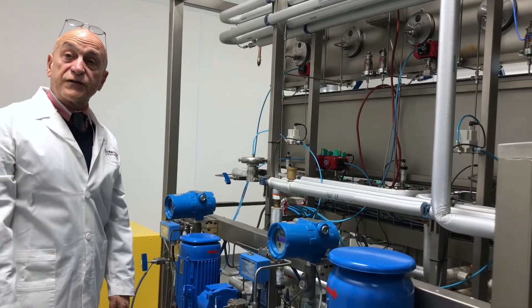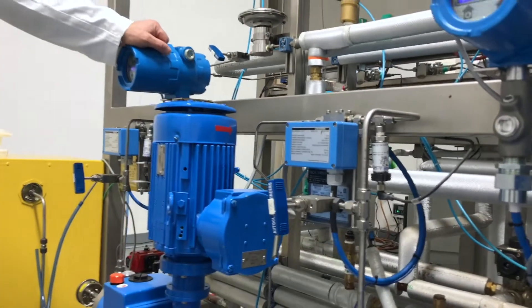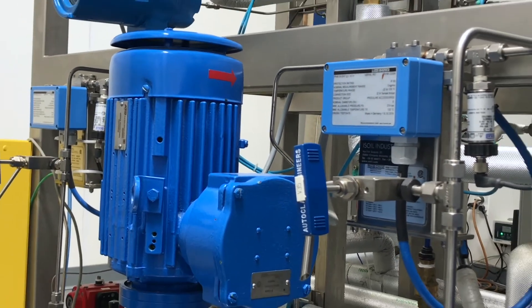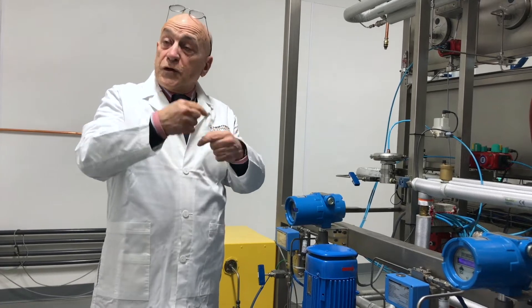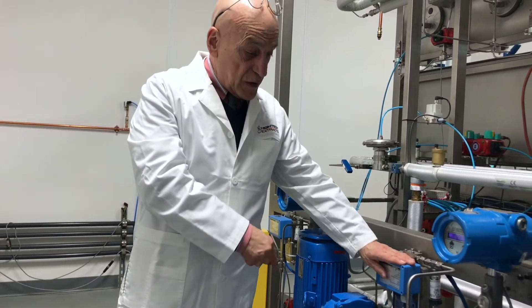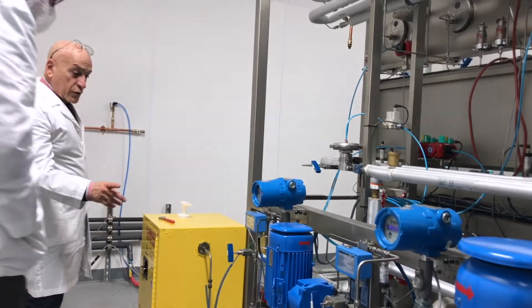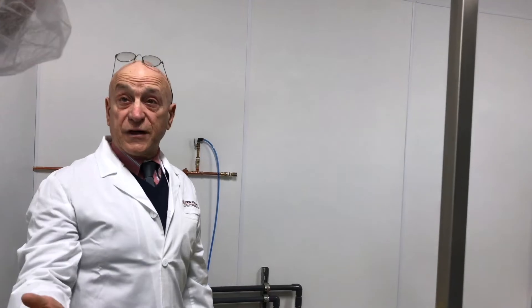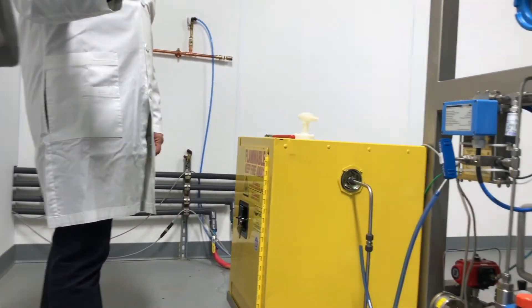The pump model has a mean time to failure of 20,000 hours running 24 hours a day, seven days a week. After the CO2 comes out it goes to the Coriolis flow meter. Coriolis flow meters have two loops opposite each other shaped like the letter omega — as flow passes through, it changes how those loops want to move, and by measuring that movement it calculates mass flow. We put the mass flow meter on the high-pressure side of the pump, where we're pumping over 4,000 psi, versus about 1,000 psi going into the pump.